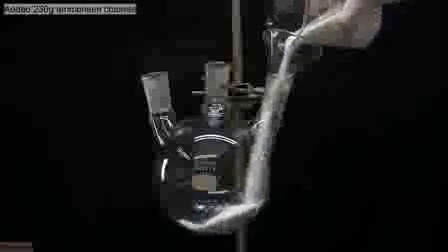To start things off, I poured the 250 grams of ammonium chloride into a 3-necked 1-liter round bottom flask. Then, directly on top of the ammonium chloride, I poured in the 500 grams of 37% formaldehyde. On top of this formaldehyde ammonium chloride mixture, I then dropped in a large stir bar. The neck on the right had a bunch of ammonium chloride in it and it wouldn't seal properly, so before moving on, I cleaned it out with a little bit of paper towel. To the leftmost neck, I add a thermometer and I simply plug the right one.